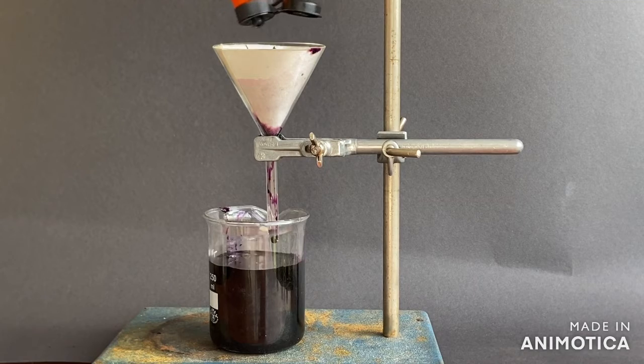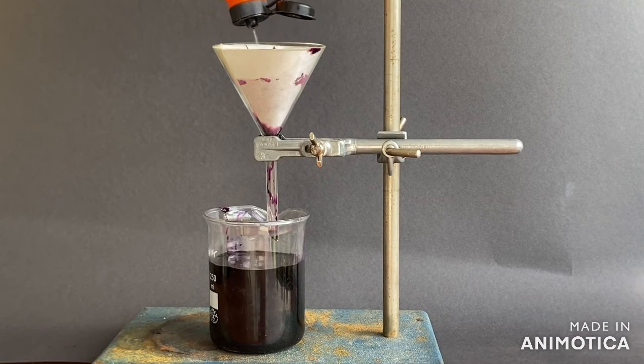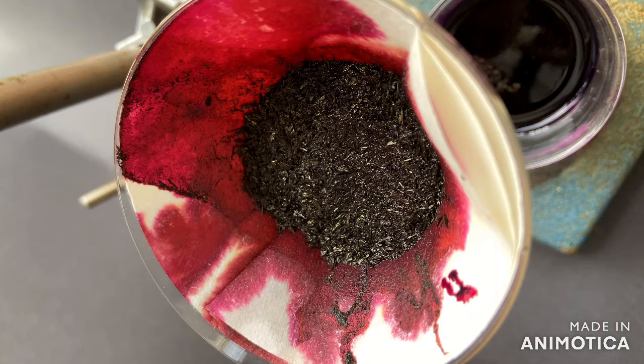I washed them with ethanol to make them dry faster. Those crystals are actually quite nice.